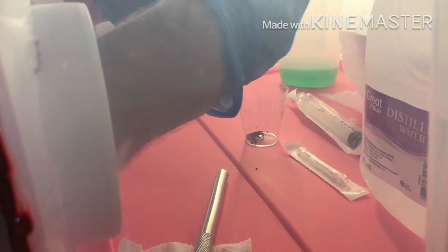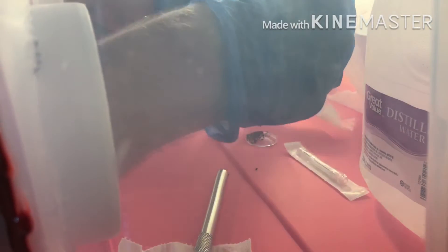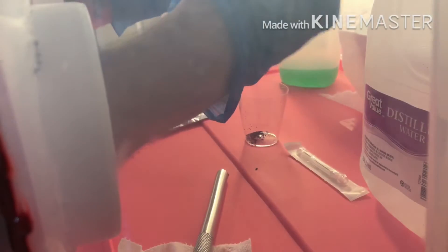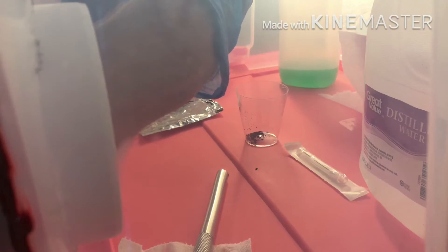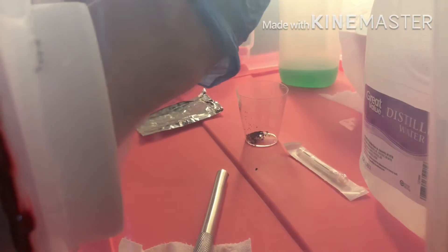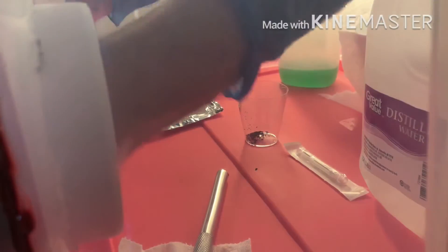Fold your print back up as quick as you can, because you want to preserve that, and get yourself a sterile syringe. Take that out of the package, which is extremely hard with gloves on — props to all you nurses.